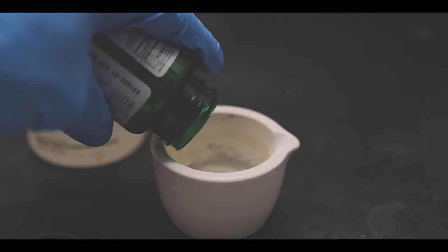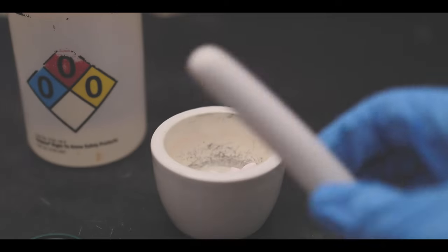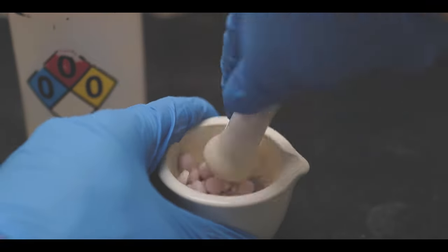To begin the experiment, 45 supplement pellets, each containing 10 milligrams of melatonin, were pulverized using a mortar and pestle.